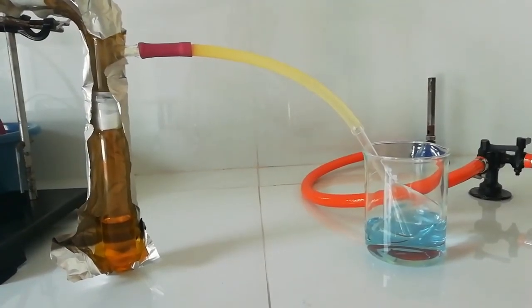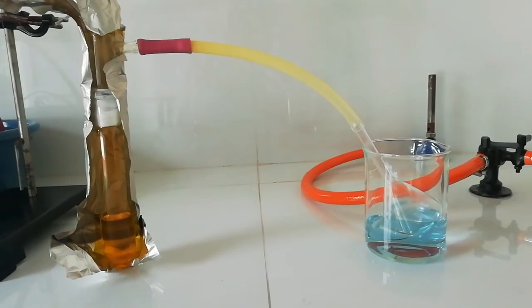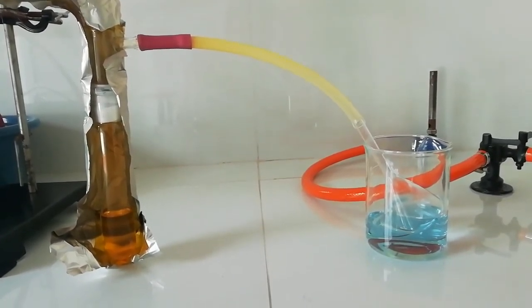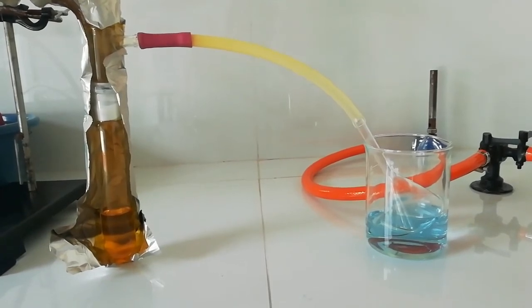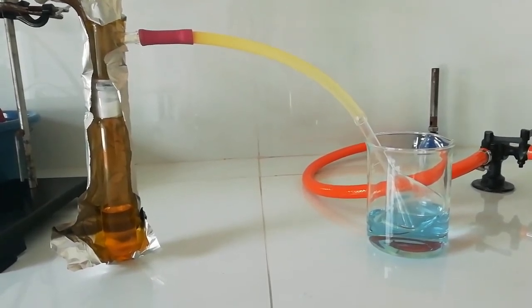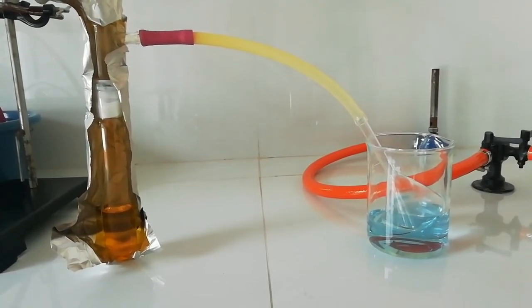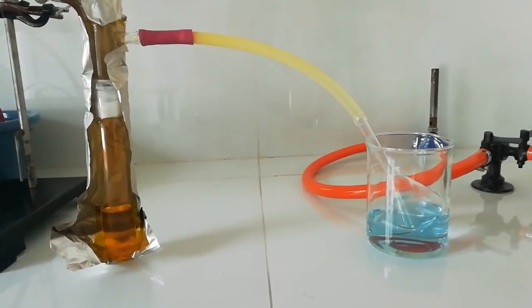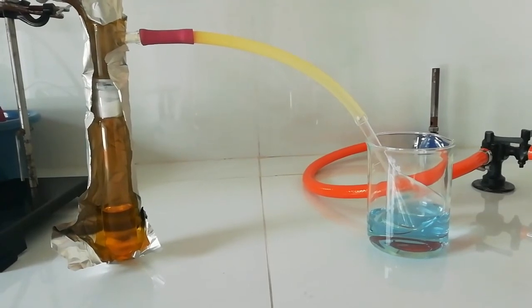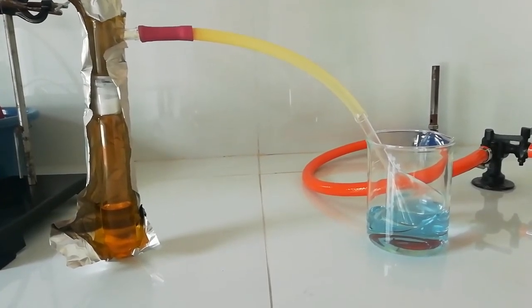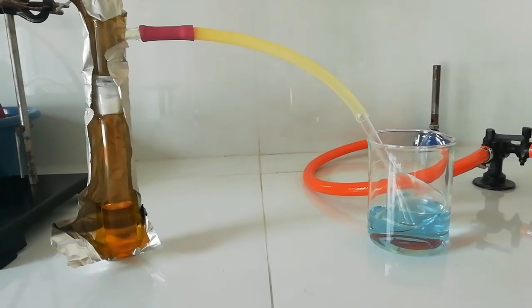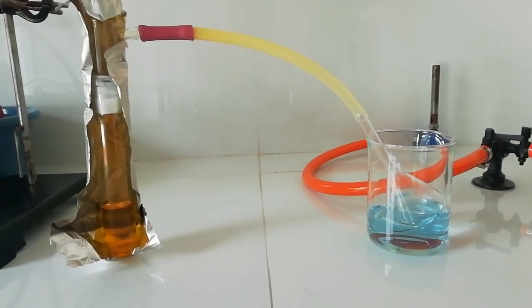This is the red fuming nitric acid. You can see there is a beaker with blue color liquid - that is for the escaping nitrogen dioxide gas and red fuming nitric acid fumes. That solution is 10% solution of sodium hydroxide that is blue color due to the universal indicator solution I added to check the pH.